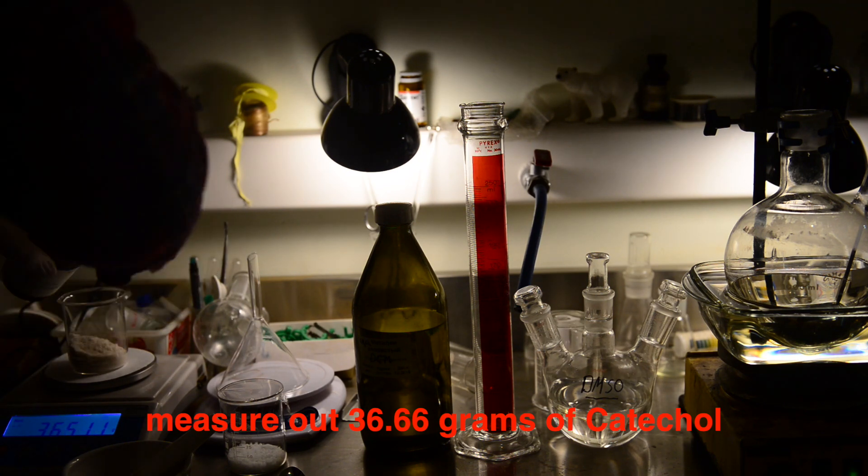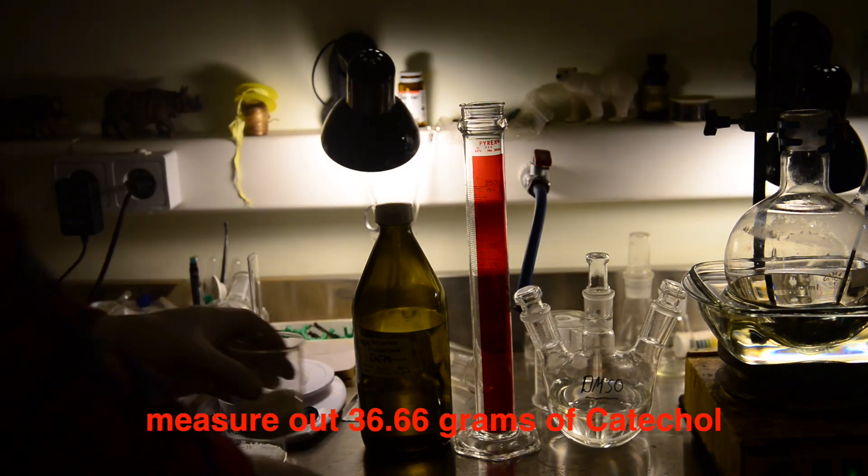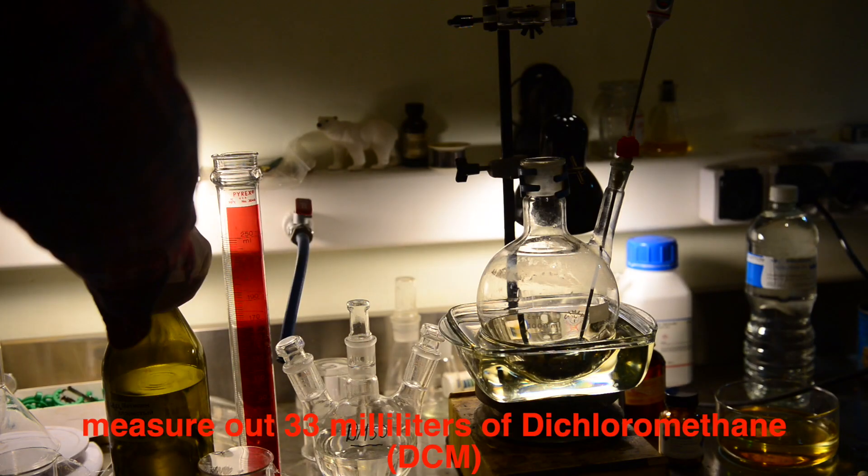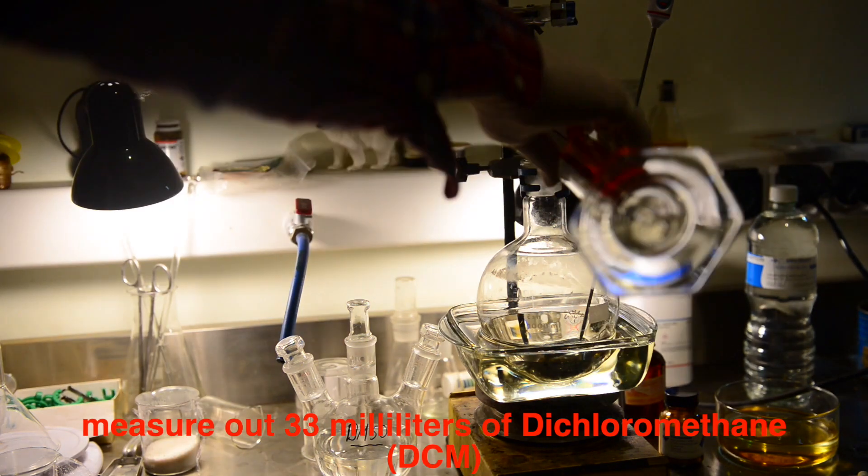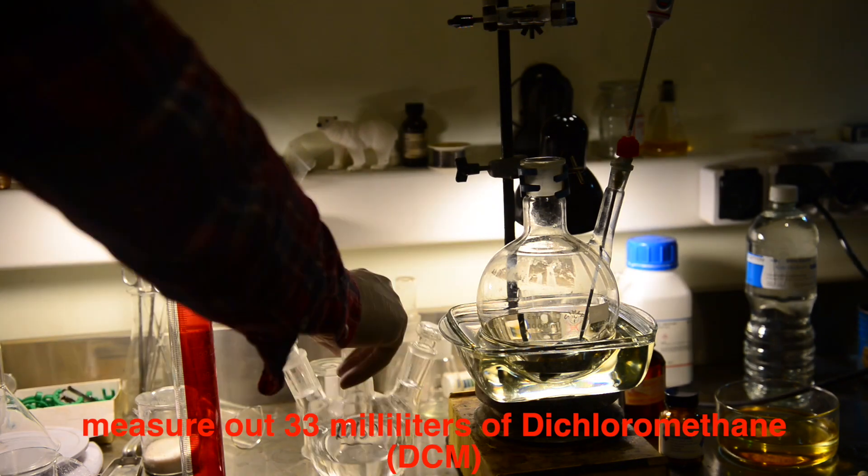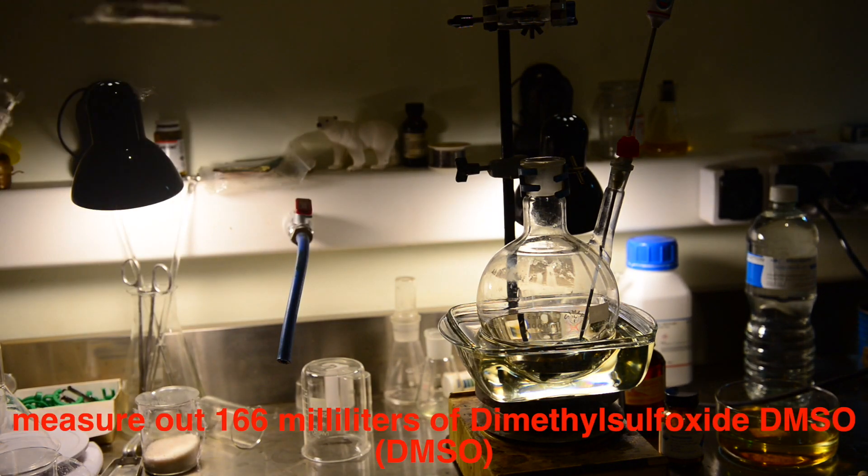We weighed out 36.66 grams of catechol. To a 2-neck, 1-liter round-bottom flask was charged 33 milliliters of dichloromethane and 166 milliliters of DMSO, dimethyl sulfoxide. We discussed in our previous video where to get and how to purify the DMSO solvent.